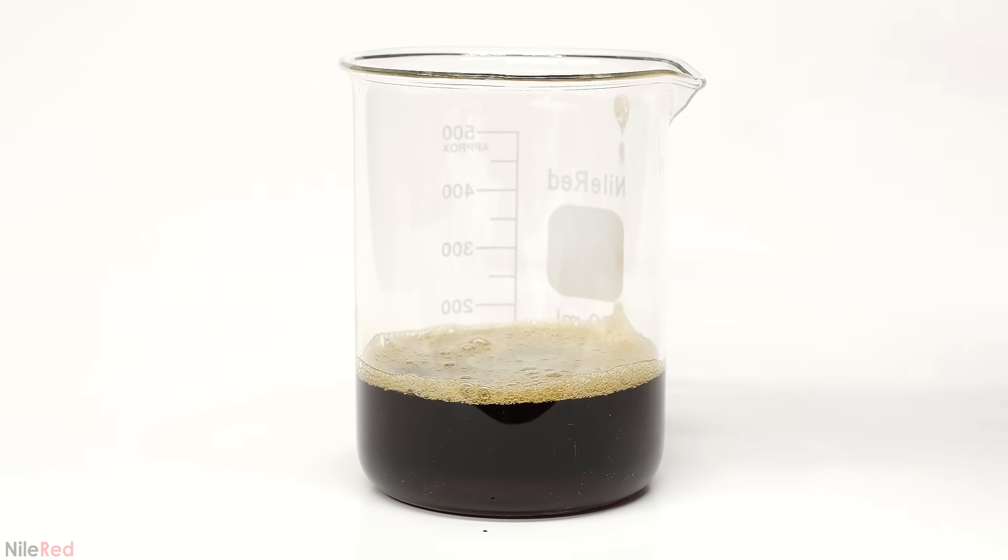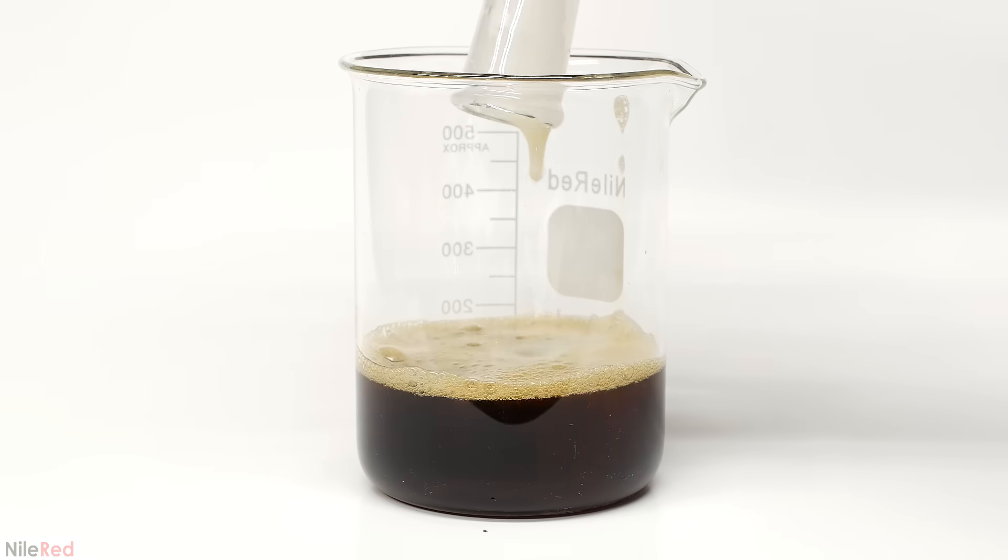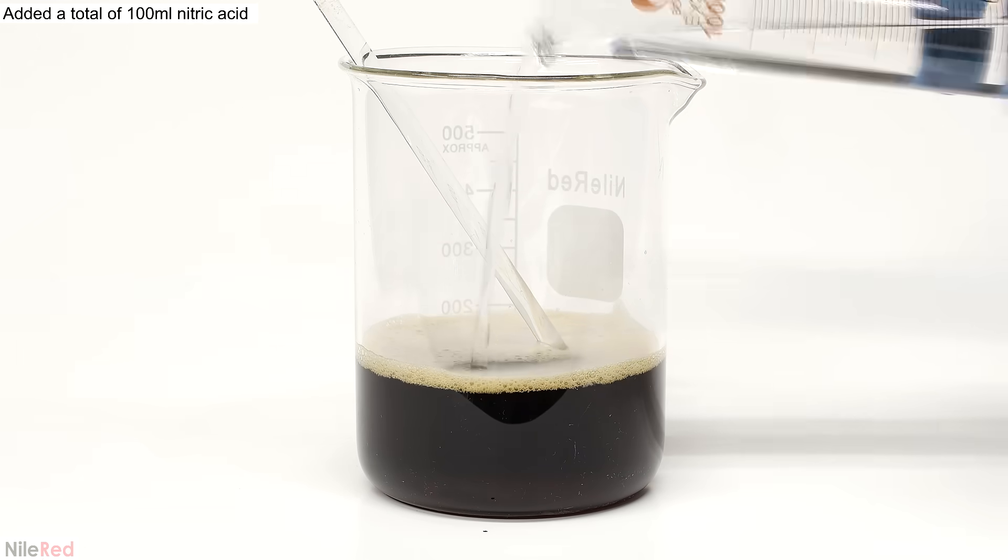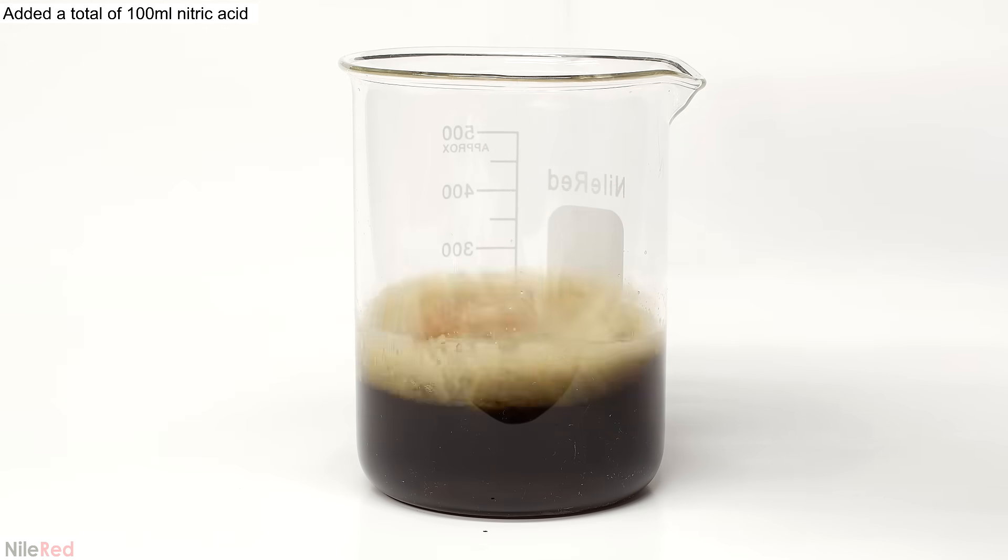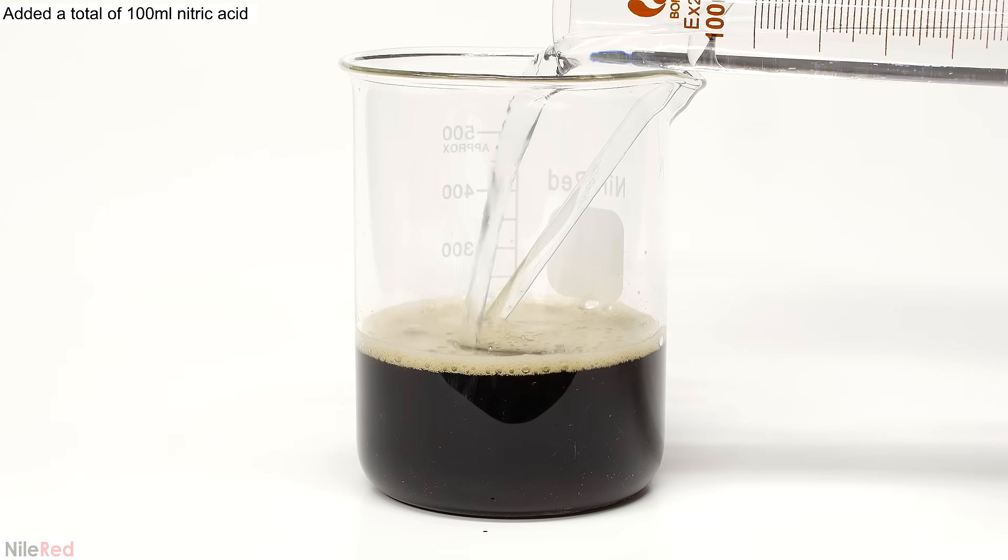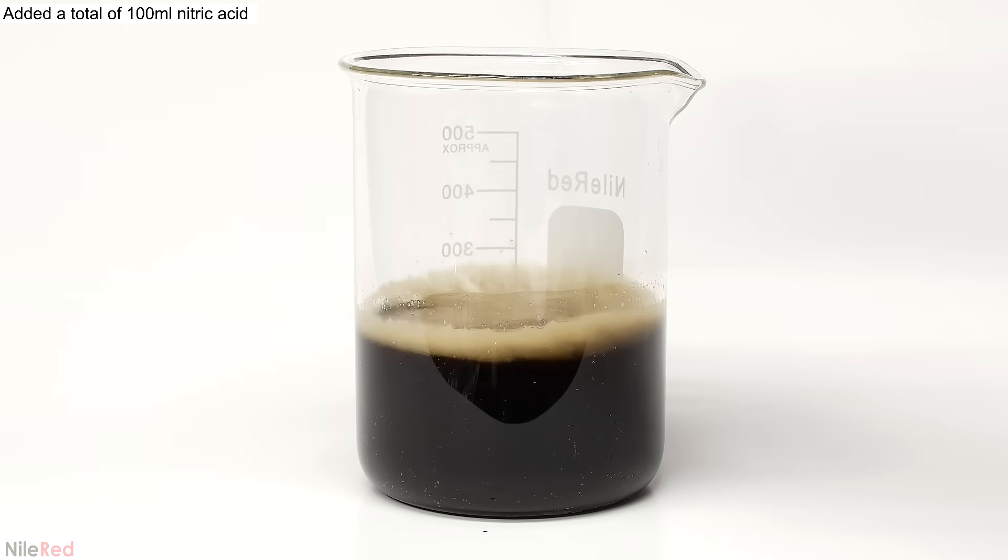To do this, I transfer it all to a beaker and start adding concentrated nitric acid. This reaction produces a lot of heat and it can easily get out of control, so the acid has to be added slowly with a lot of mixing in between.